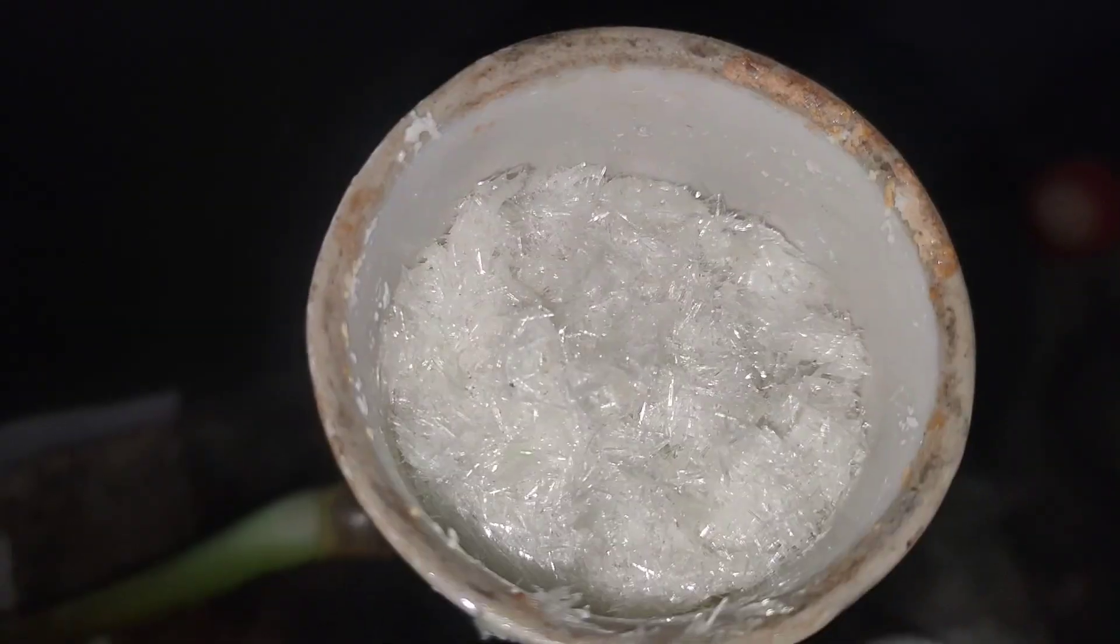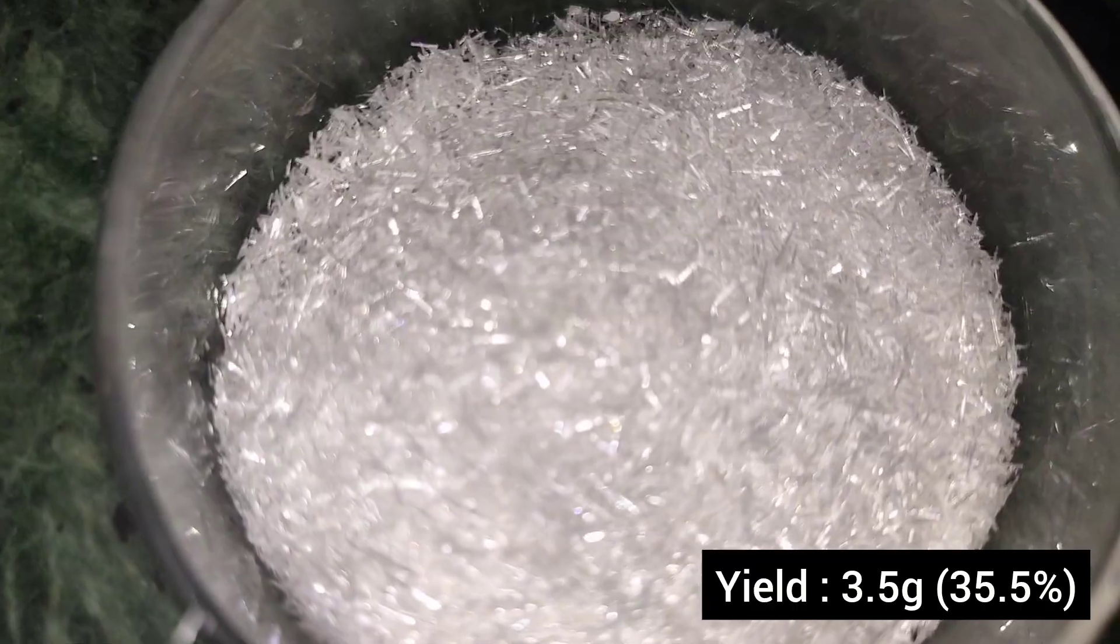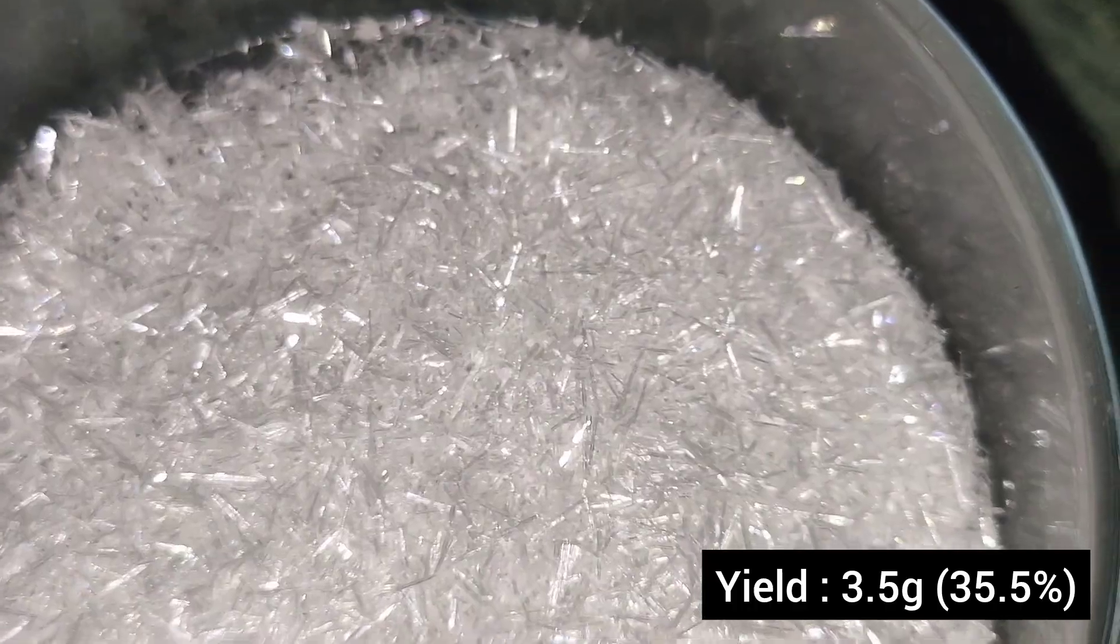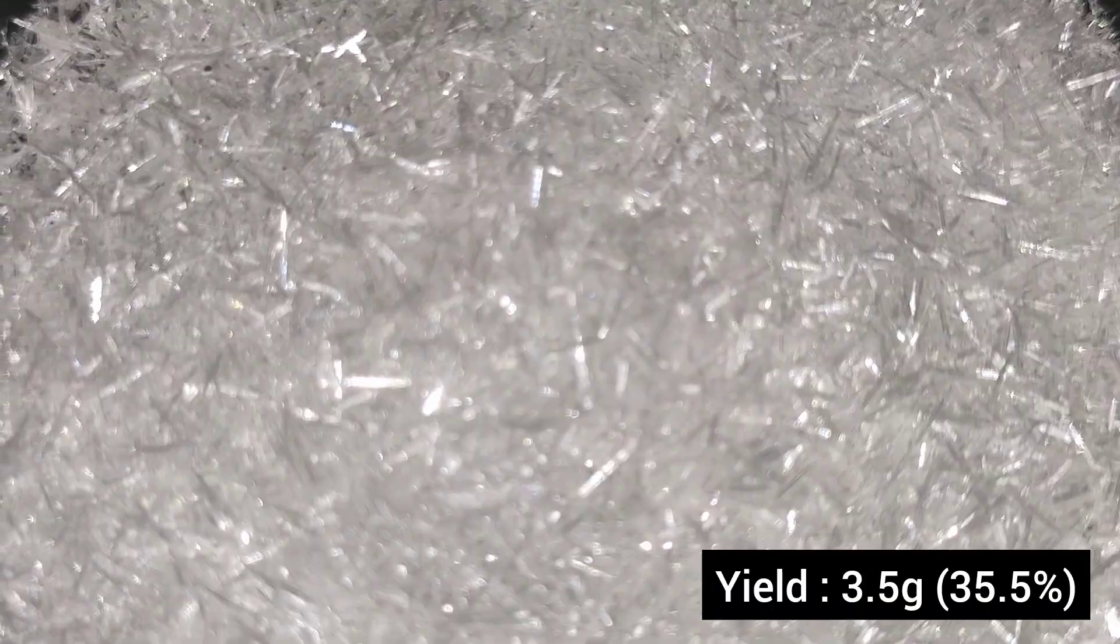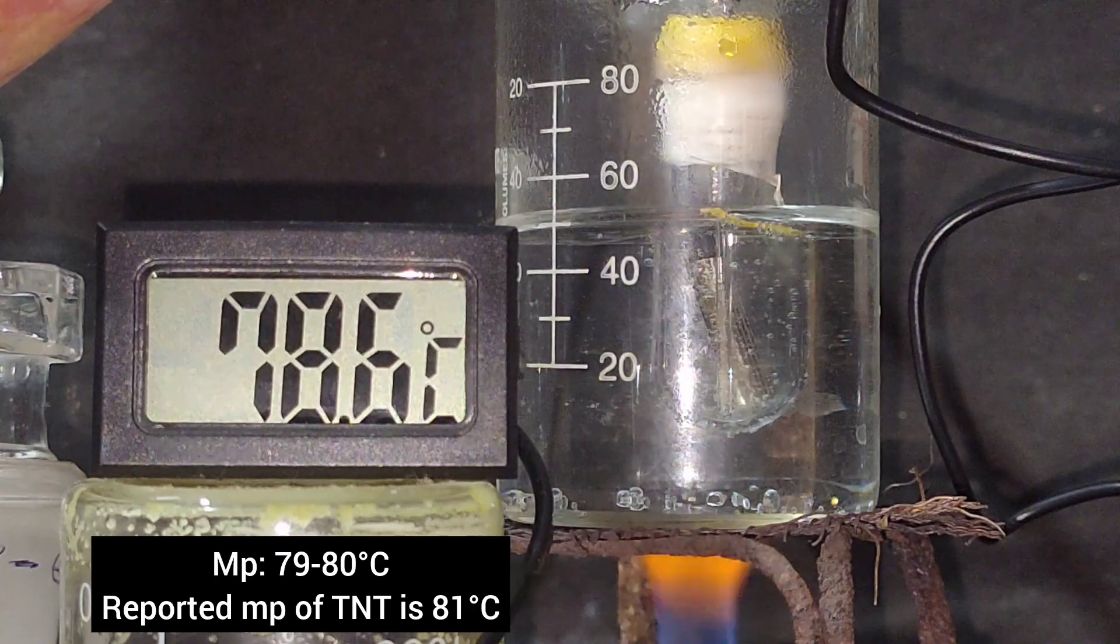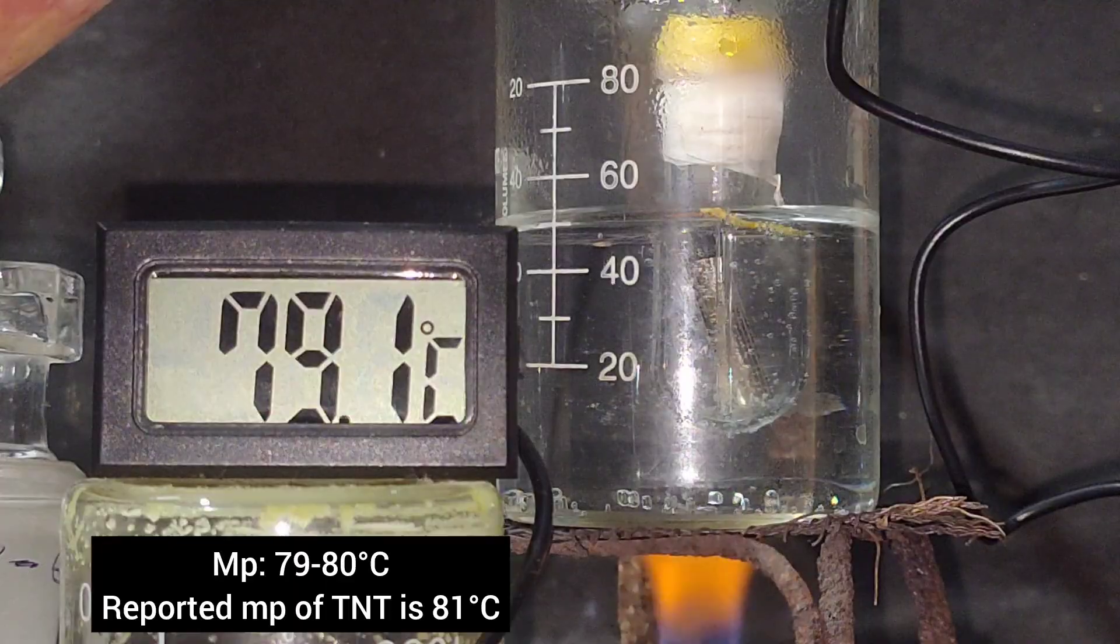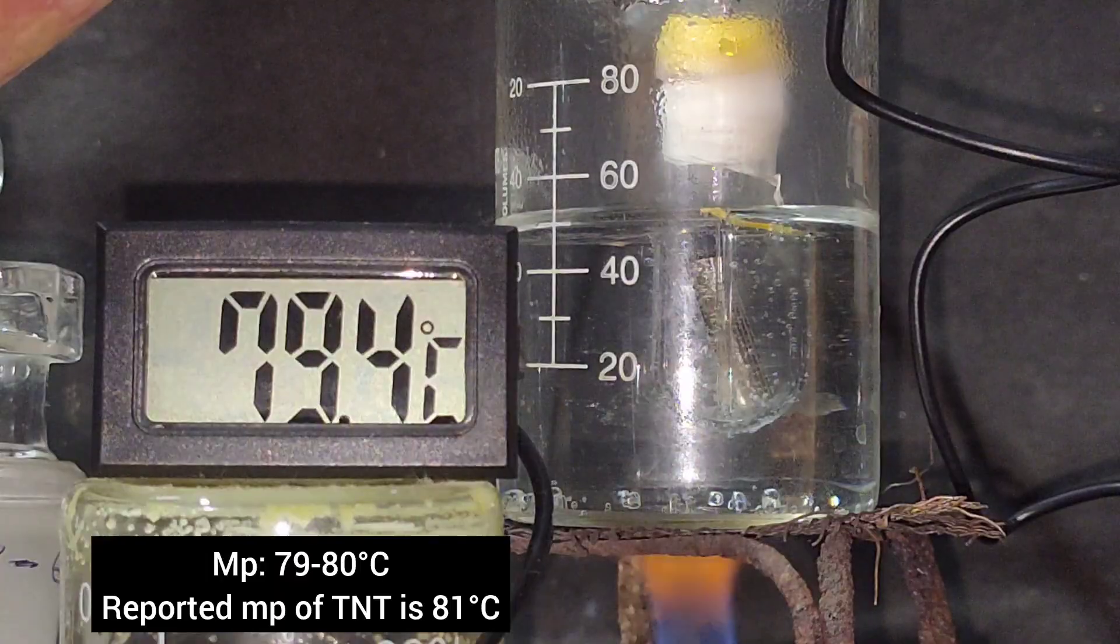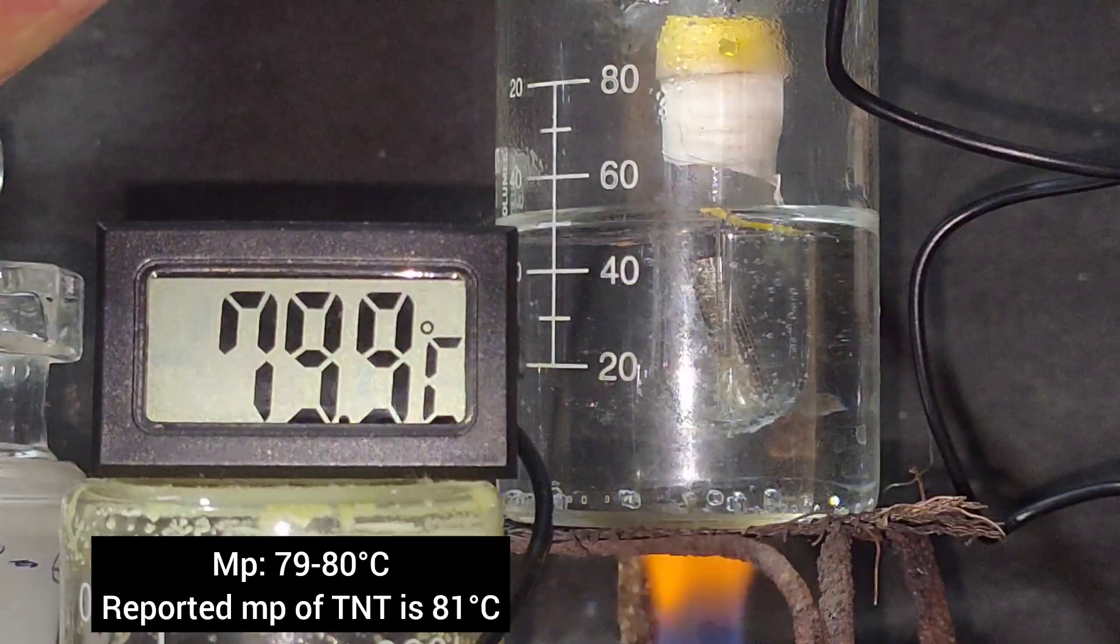Under a white LED they appear totally white, whereas under a fluorescent light they appear slightly yellow. The yield was 3.5 grams which corresponds to a percent yield of 35%. I checked the melting point of the TNT I made. It started melting around 79 degrees Celsius and completely melted at 80 degrees Celsius. The reported melting point of TNT is 81 degrees Celsius. Therefore my product is almost pure as the melting point is very close to the reported melting point.